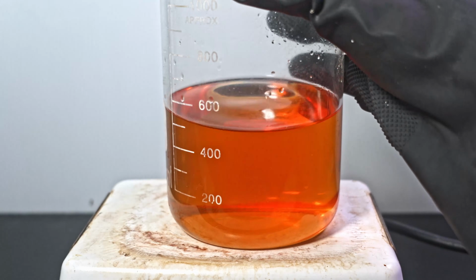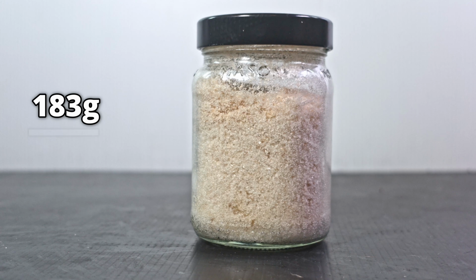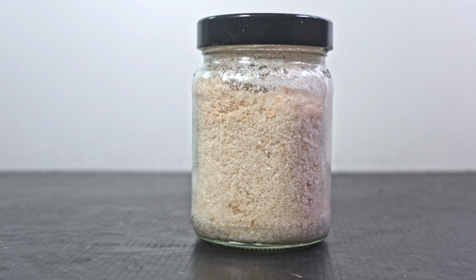So, I boiled down the remaining juice for a while. After freezing, I get the rest of my crystals. That brought the yield up to 183 grams, making a 55% yield. Still a little disappointing considering some guy in Science Madness got an 87% yield, but still far better than other chem tubers who undertook the same route.